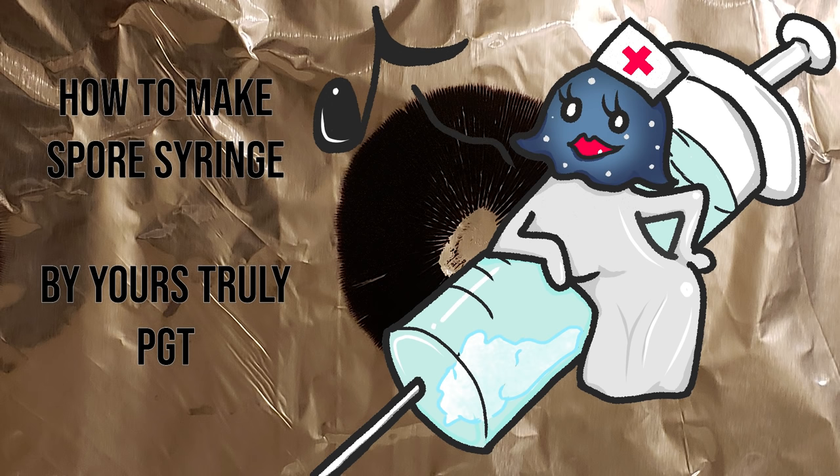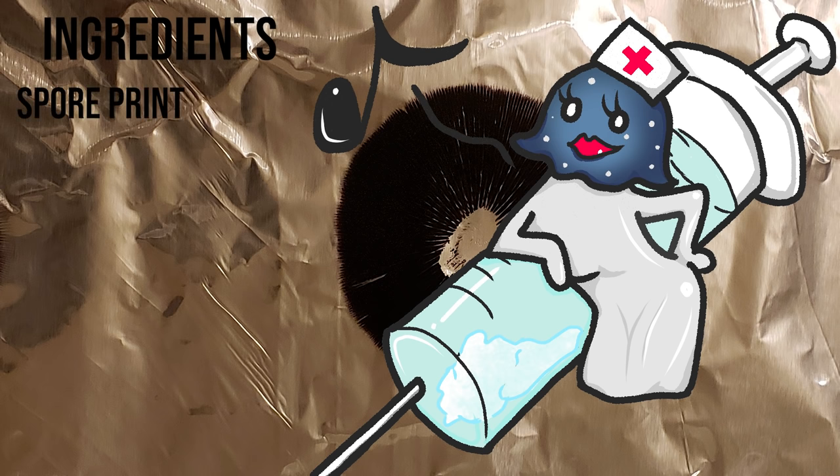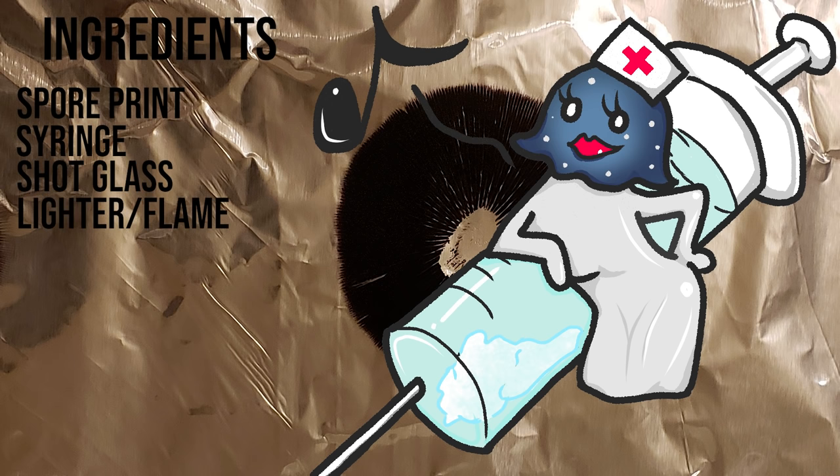Quick list of ingredients you're going to need: you're going to want a spore print, a syringe either used or new, you need a shot glass, a lighter or some kind of flame source to flame sterilize, and you want some isopropyl alcohol for sanitization.